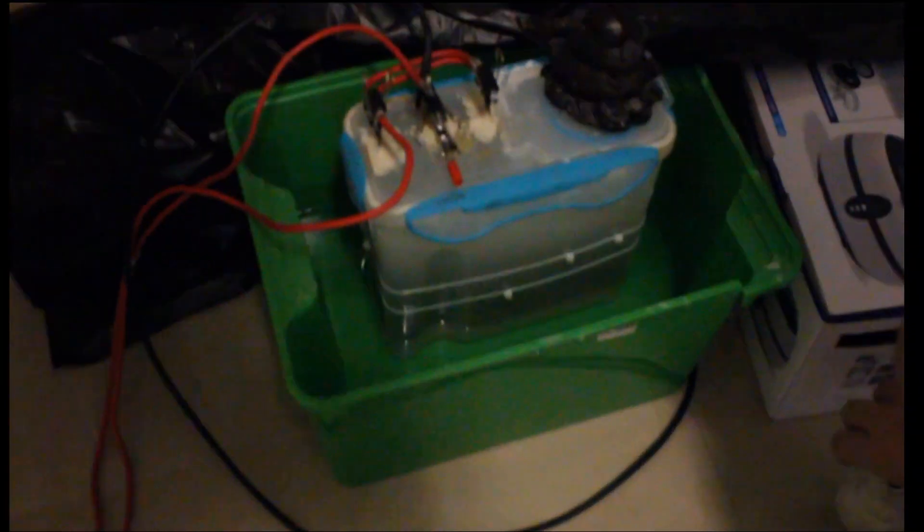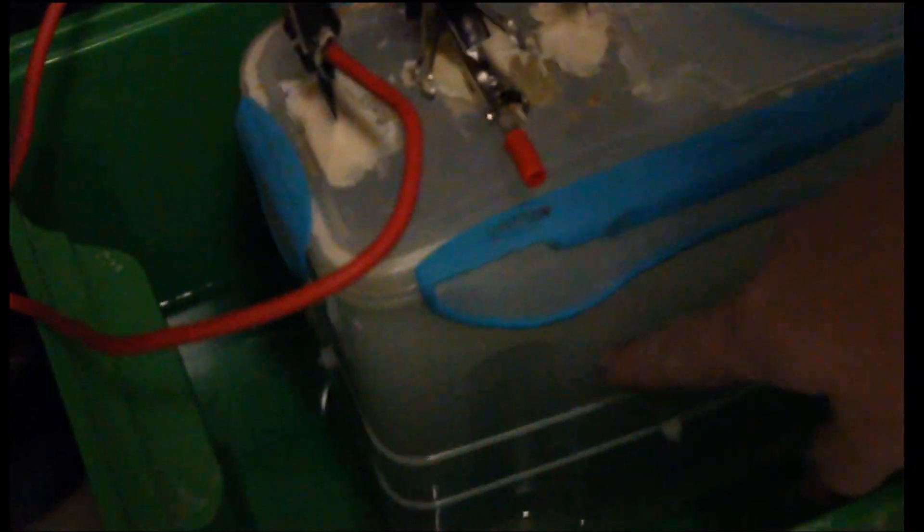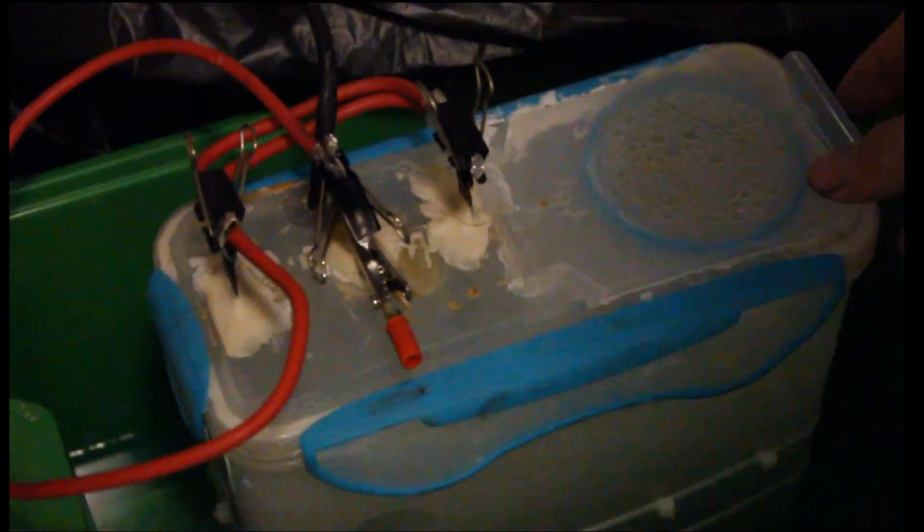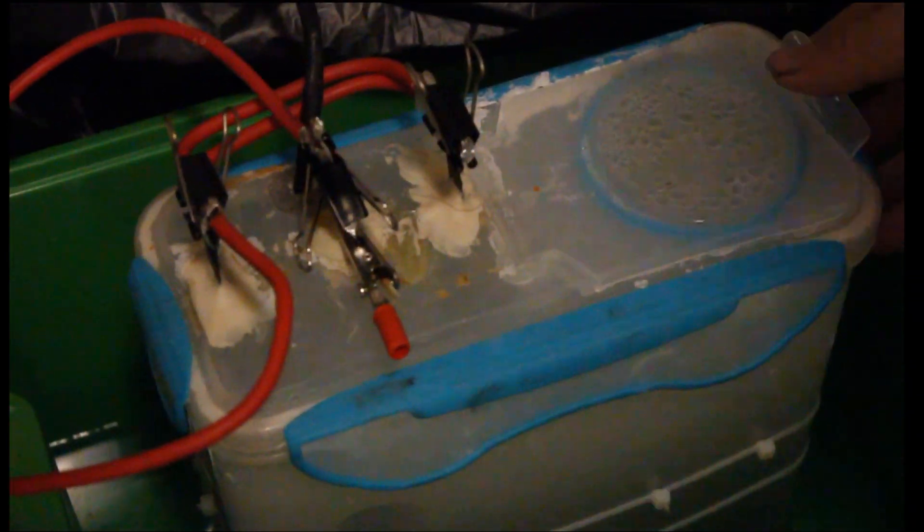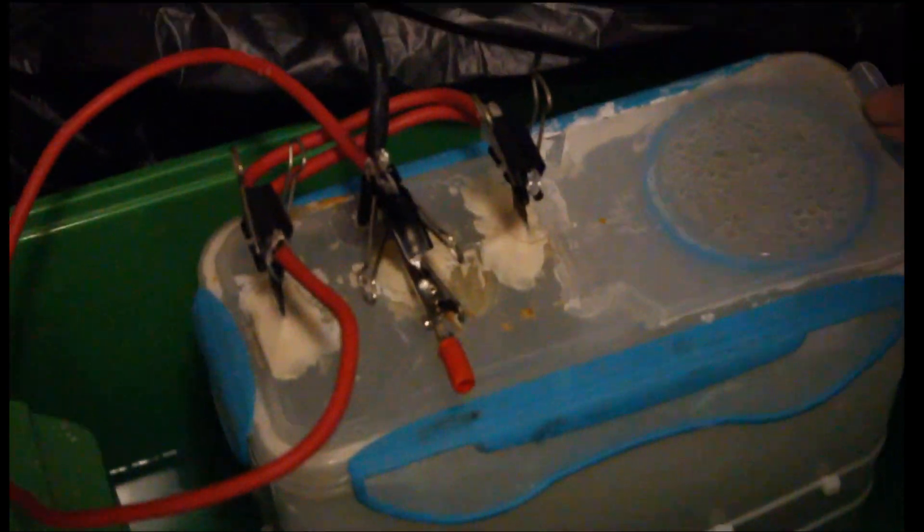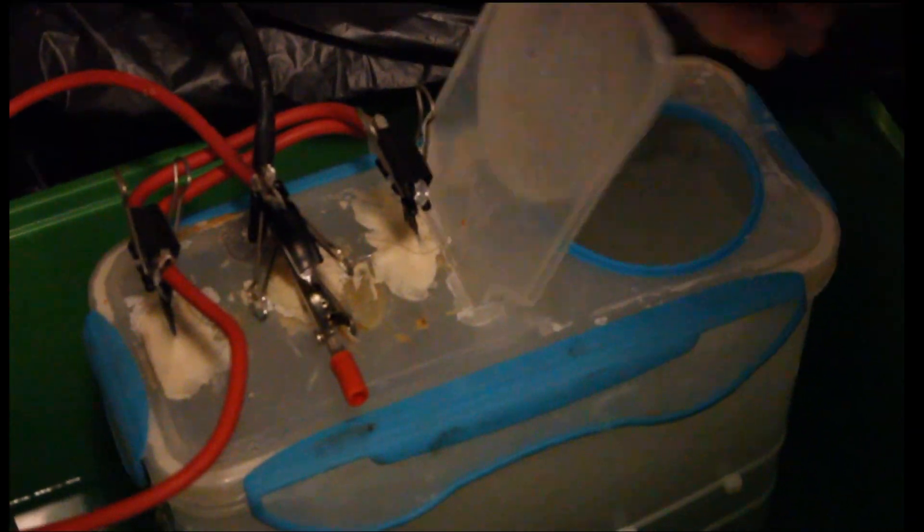Now calcium chloride does two things. It builds up on the cathode which creates some sort of a diaphragm. It looks like this horrible white thing which I'll show you later, but that's good for us. Another thing it also does is it keeps the pH really low.